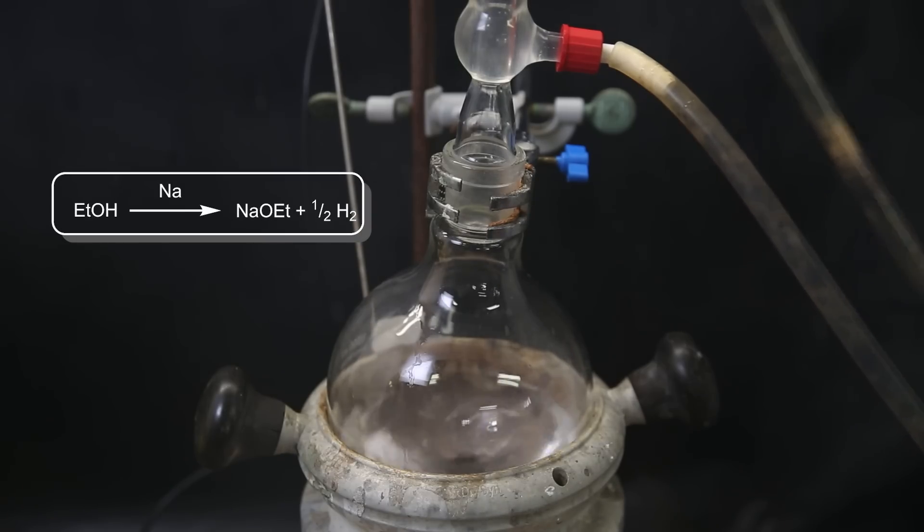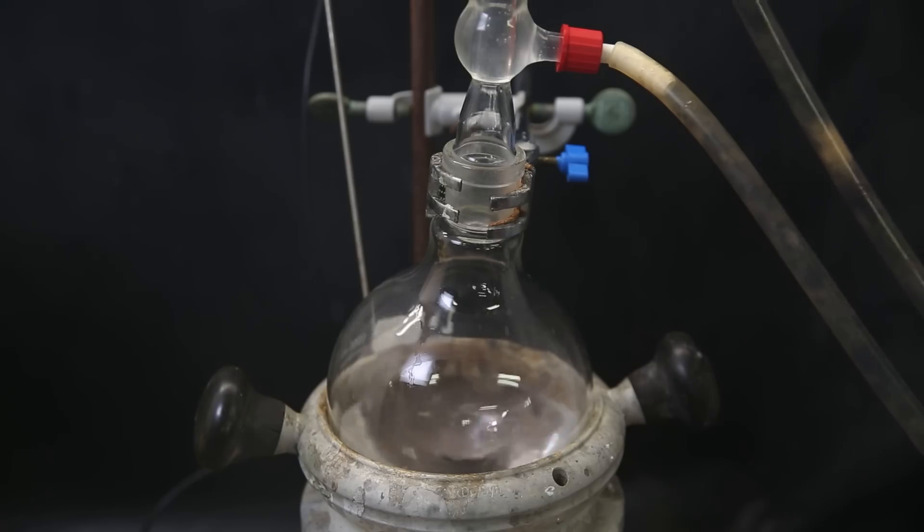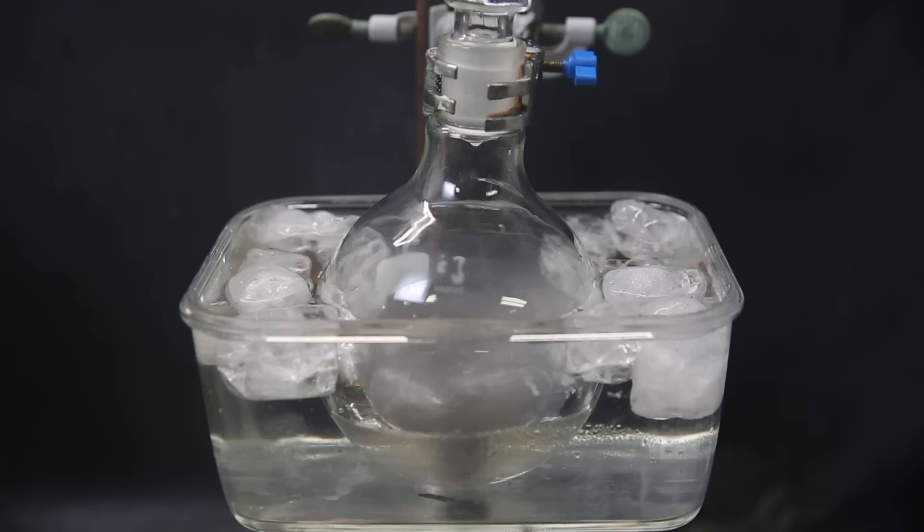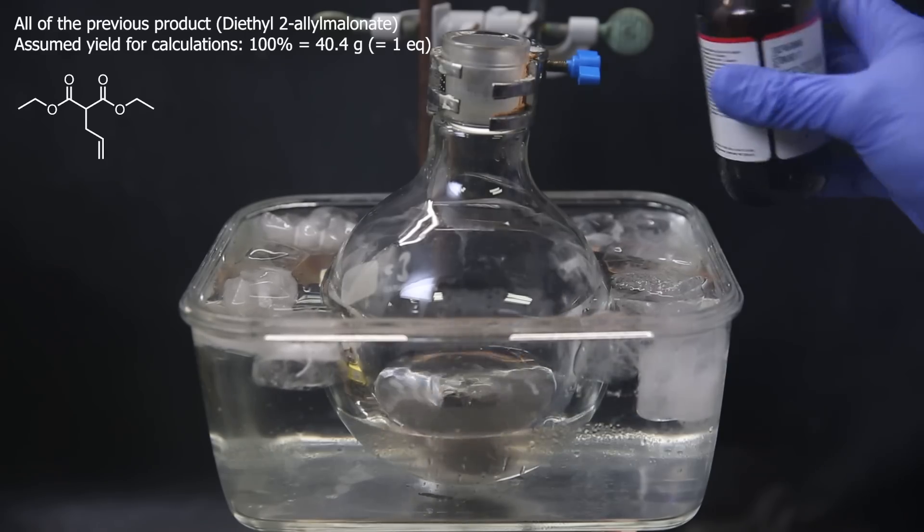In this reaction, the sodium reacts with ethanol to form sodium ethoxide, which is a strong base, and hydrogen, which floats away. When that's done, I set the flask in an ice bath to cool it down, and then add all of the previous product.